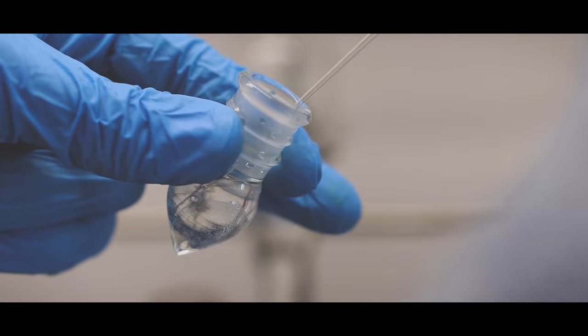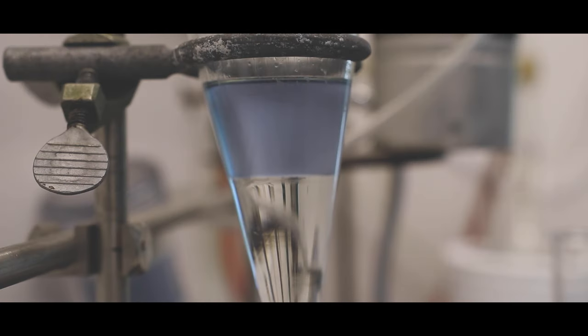In order to determine the identity of the product, the phases were separated and the organic layer prepped for a TLC analysis.